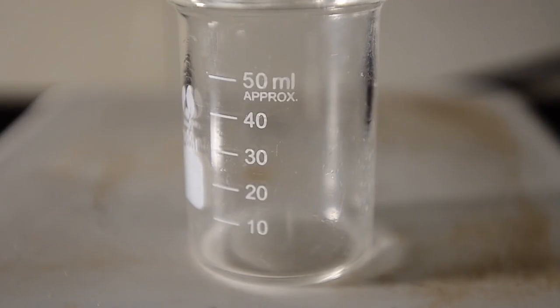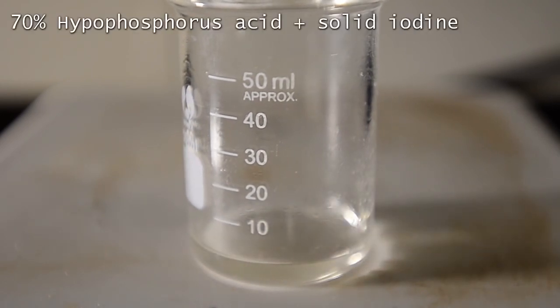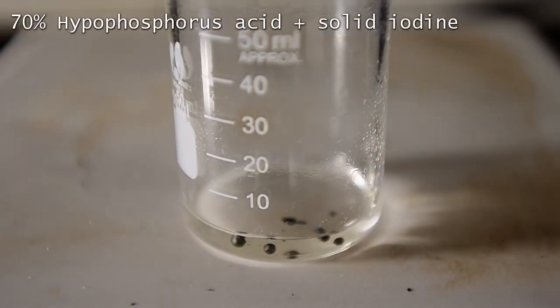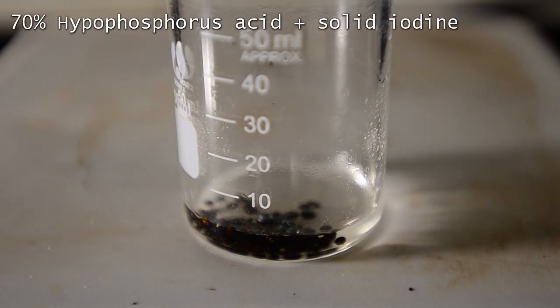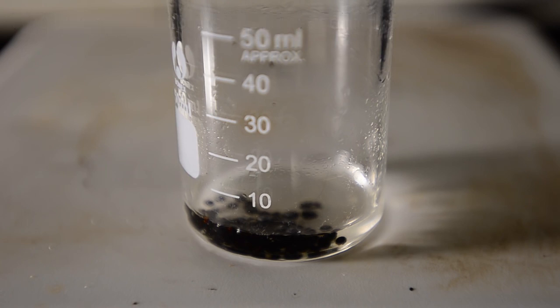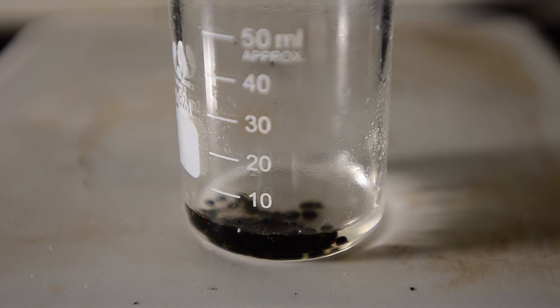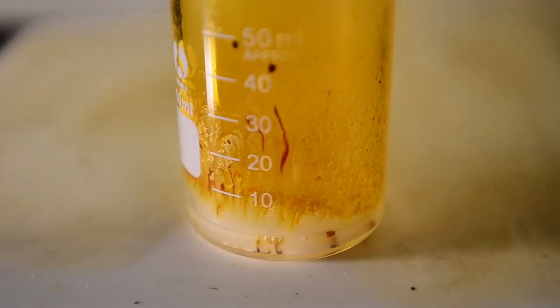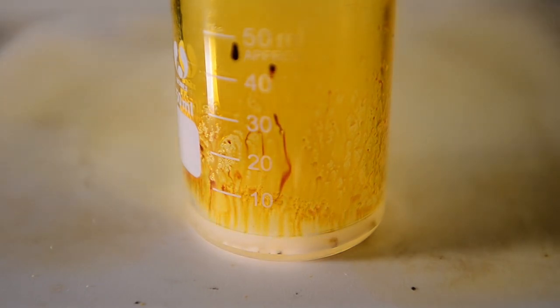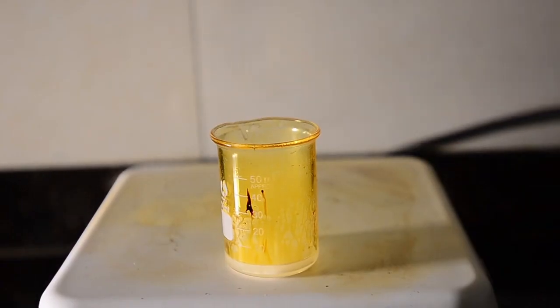So let's first put it to the test by reducing some iodine. We placed a small amount in a beaker and added a spatula of solid iodine at room temperature. I'd say that worked pretty well, maybe a bit too well.